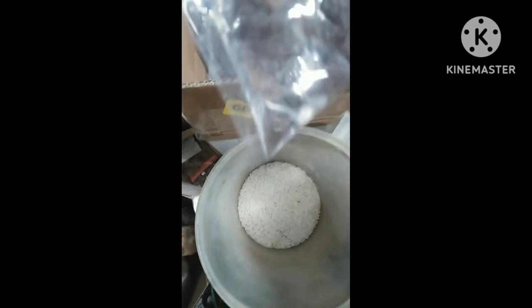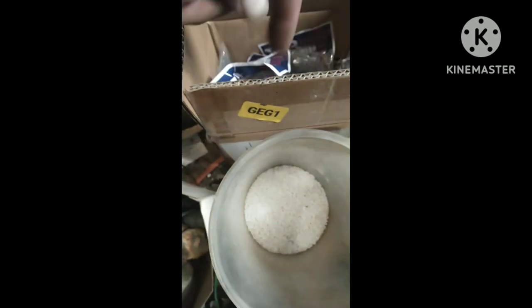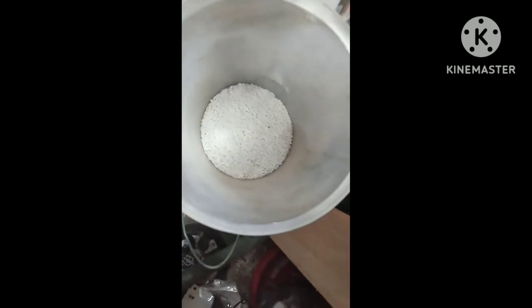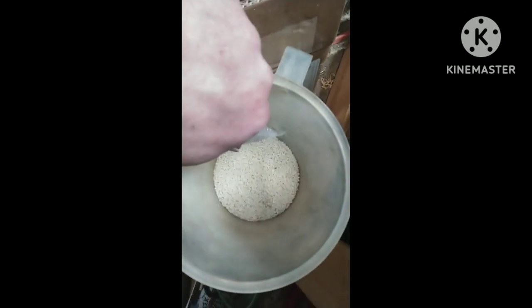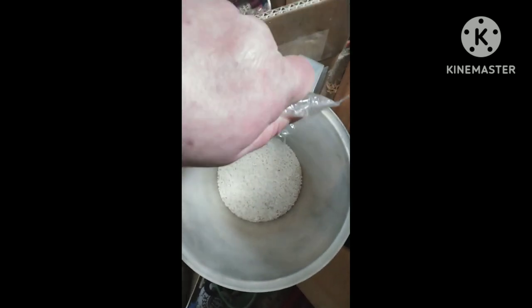What is up YouTubers and YouTubettes! So I have gone ahead and opened up 15 of these packs into here without the water, and I'm going to take all 15 of the water packs and dump them in. Just like so. I'll do that and I'll be right back.